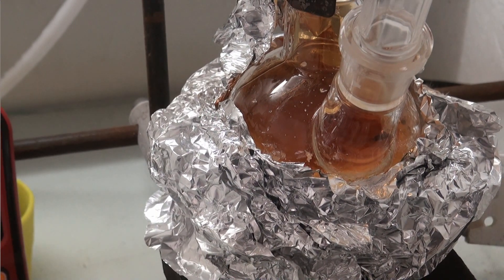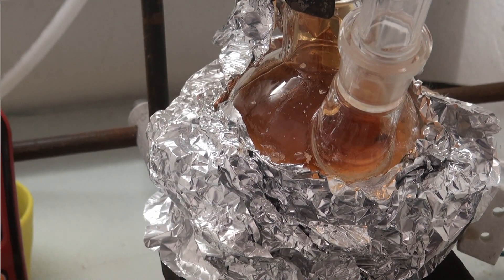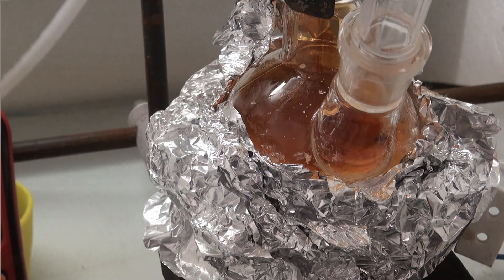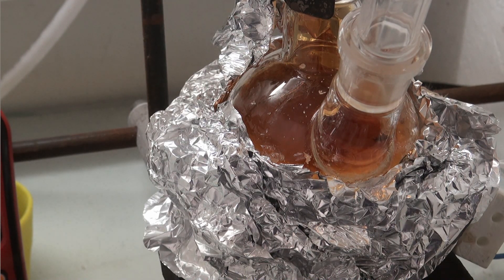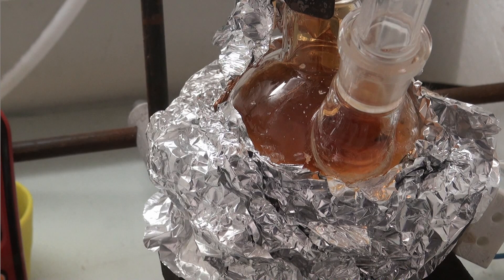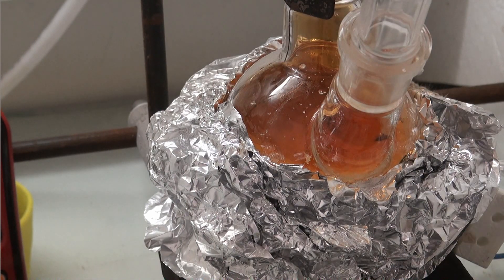At this point I stopped the distillation because there was nearly no distillate coming over anymore. When looking into the distilling flask, I was able to see that the reaction mixture has solidified.